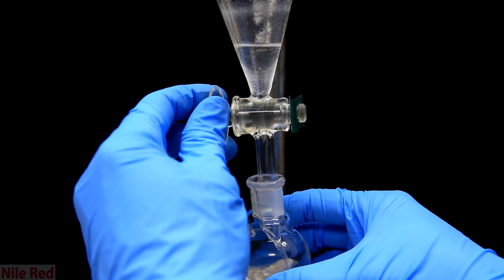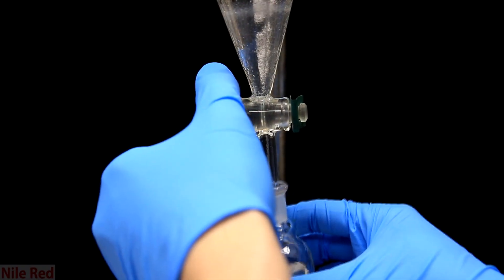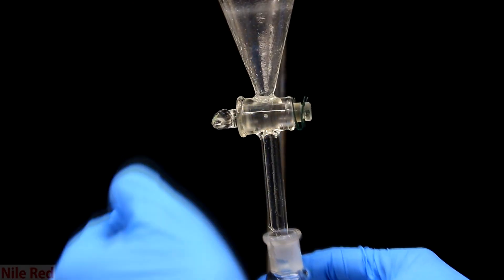The ether is added, we cap, we shake it, we vent it and we let the layers separate and then we drain off each layer separately.